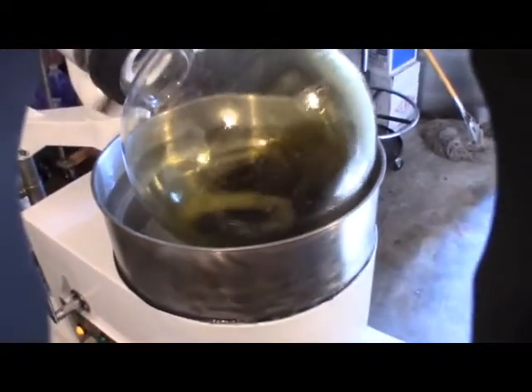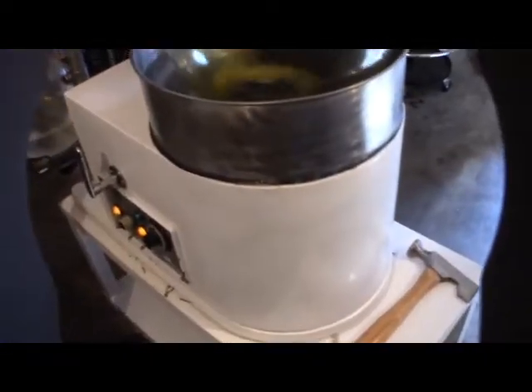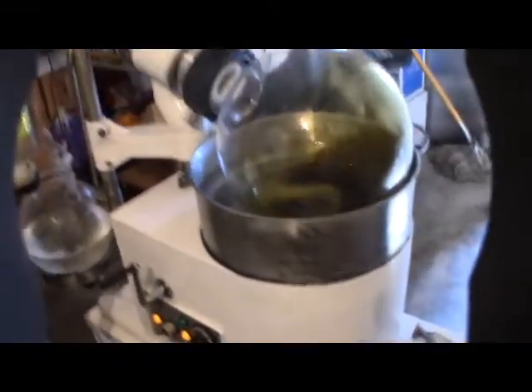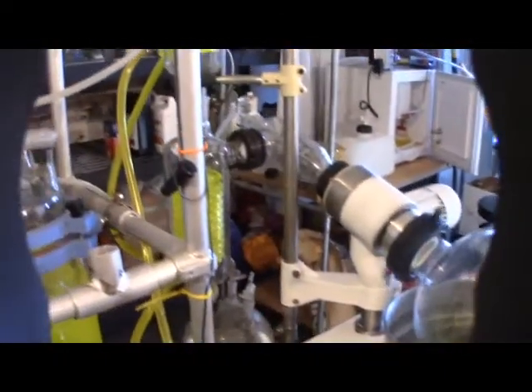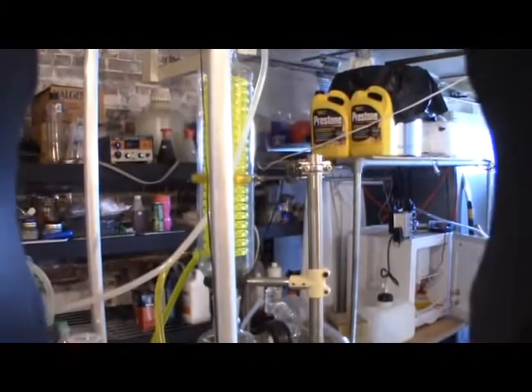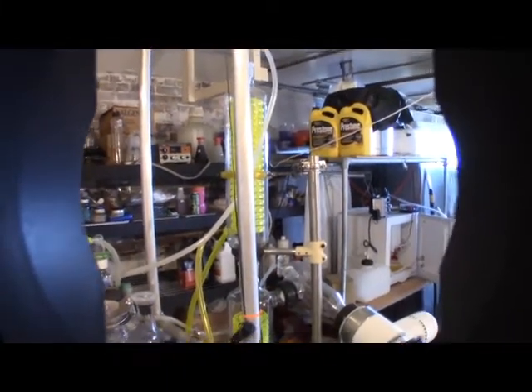This soft distillation, as you can see, is fairly light in color. You don't want to saturate and let it sit and soak. That's just going to pick up all your chlorophyll, lipids, waxes, and other things you don't want in your gold oil.